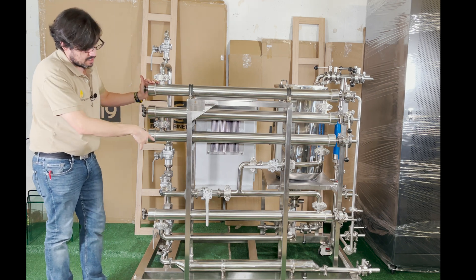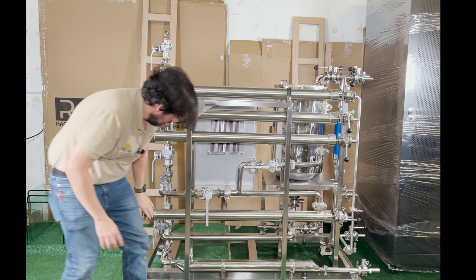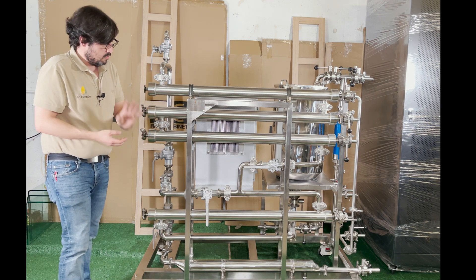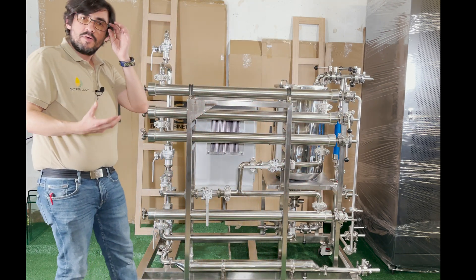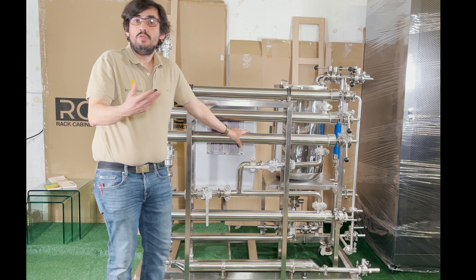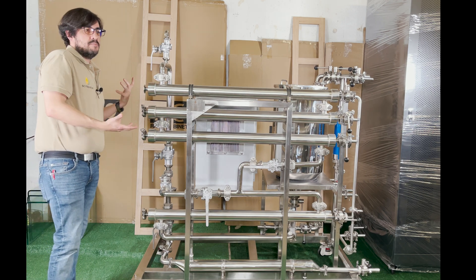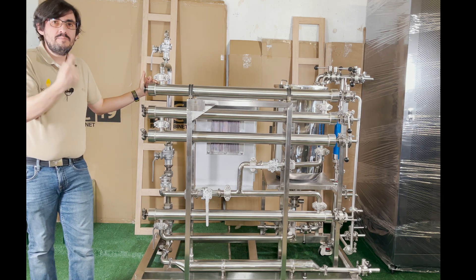In this device, in this version of the system, the fluid comes in through this pipe, through this membrane. This membrane is going to remove a small portion of that feed. Whatever permeates will come out here; whatever does not permeate will flow through this pipe, then continue to a second housing to get concentrated again, to a third and a fourth housing — concentrated up to four times. So you could start with something that is a hundred parts solvent to one part crude, and filter that in one pass four times.